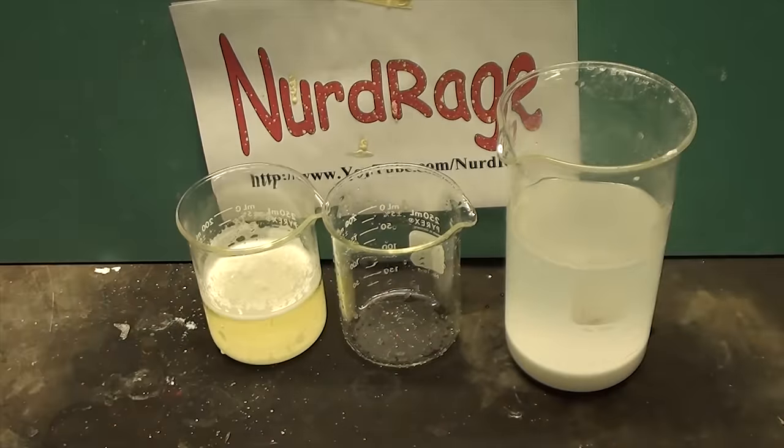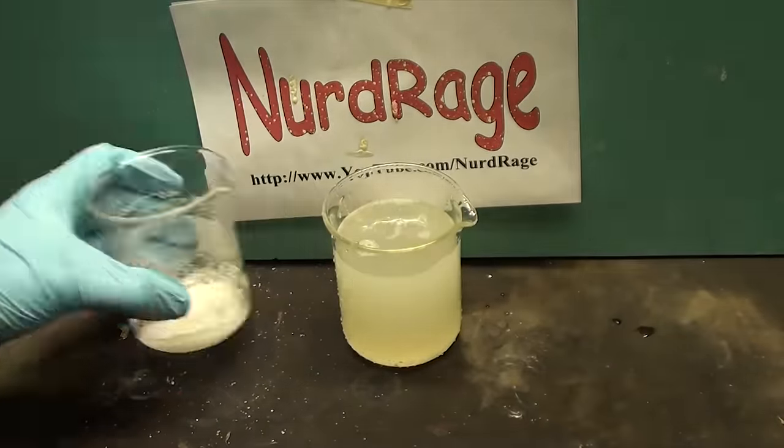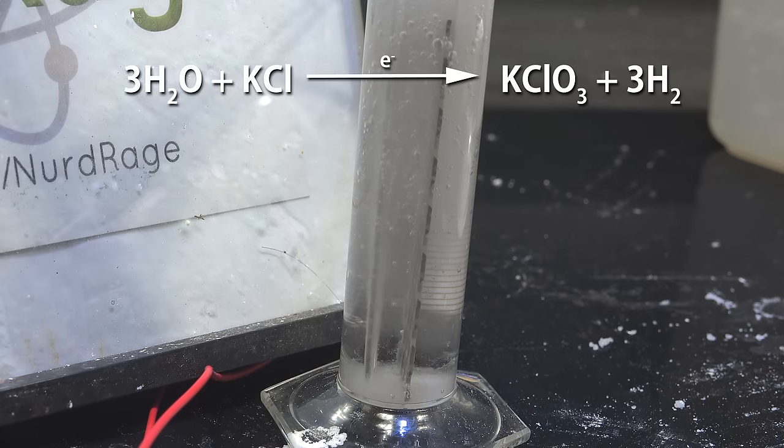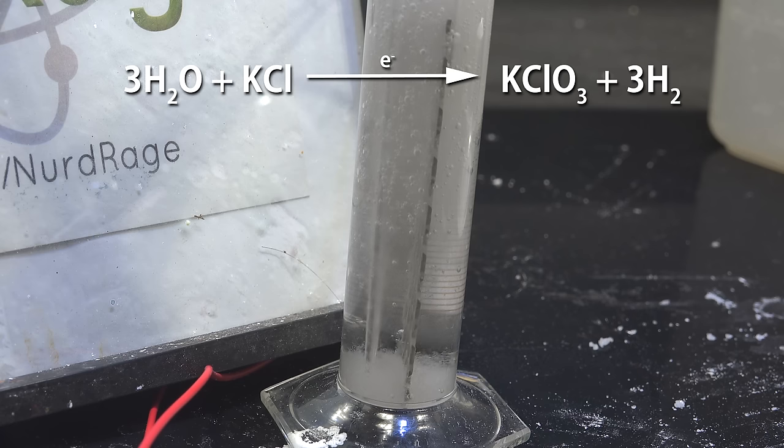You need large quantities of bleach to get small amounts of potassium chlorate. In this video we're going to make potassium chlorate by electrolysis. The idea is to apply electric current directly to a solution of potassium chloride. This converts it to potassium chlorate.